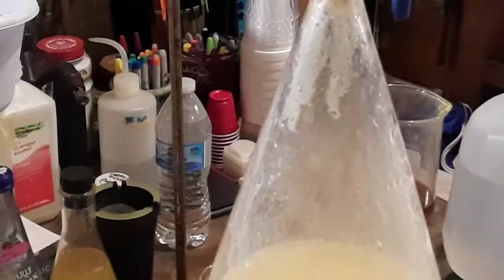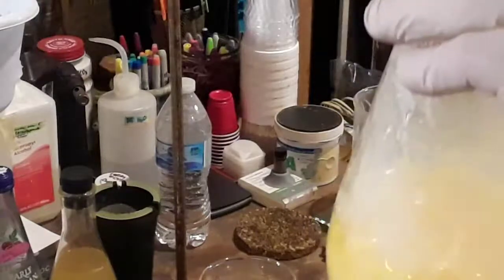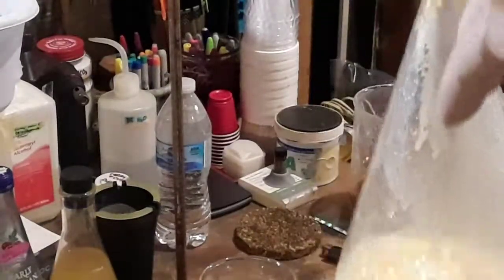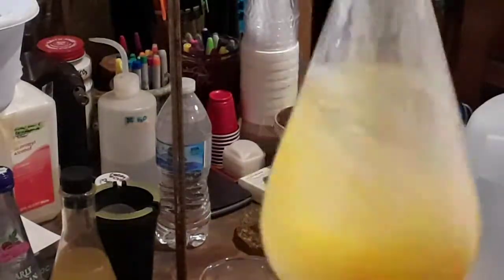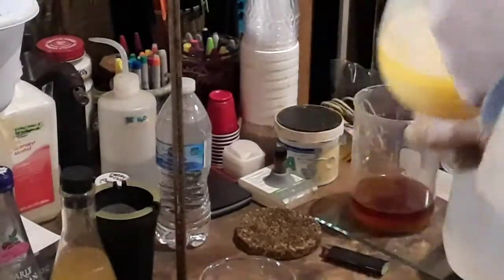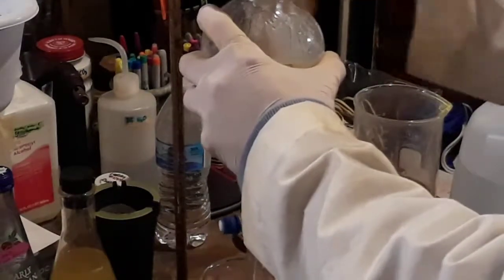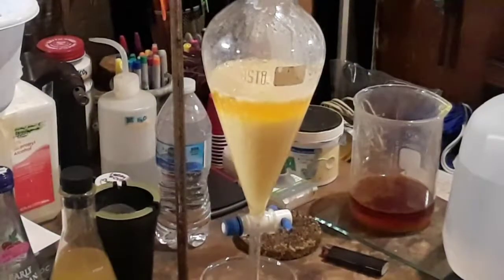You can see the CO2 evolving, trying to push up residual moisture in the stopcock. I can probably just swirl this with it left open — that's probably the safest approach, although it does sound cool when you release it. This is going to take a while, so I'm going to reattach this, cut the video — since you've already seen what this process looks like — and come back once it is complete.